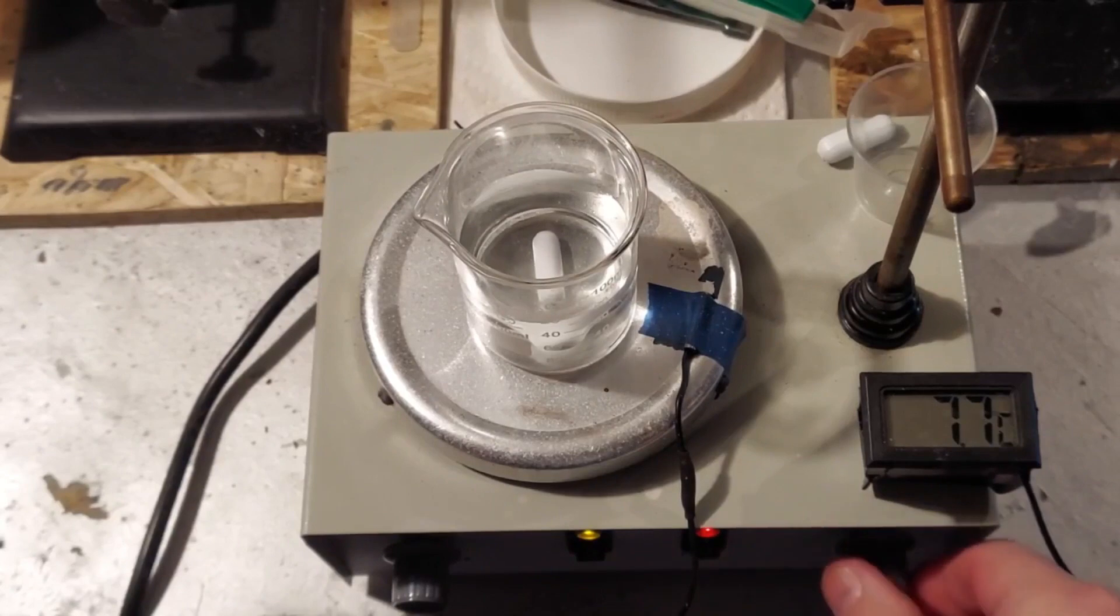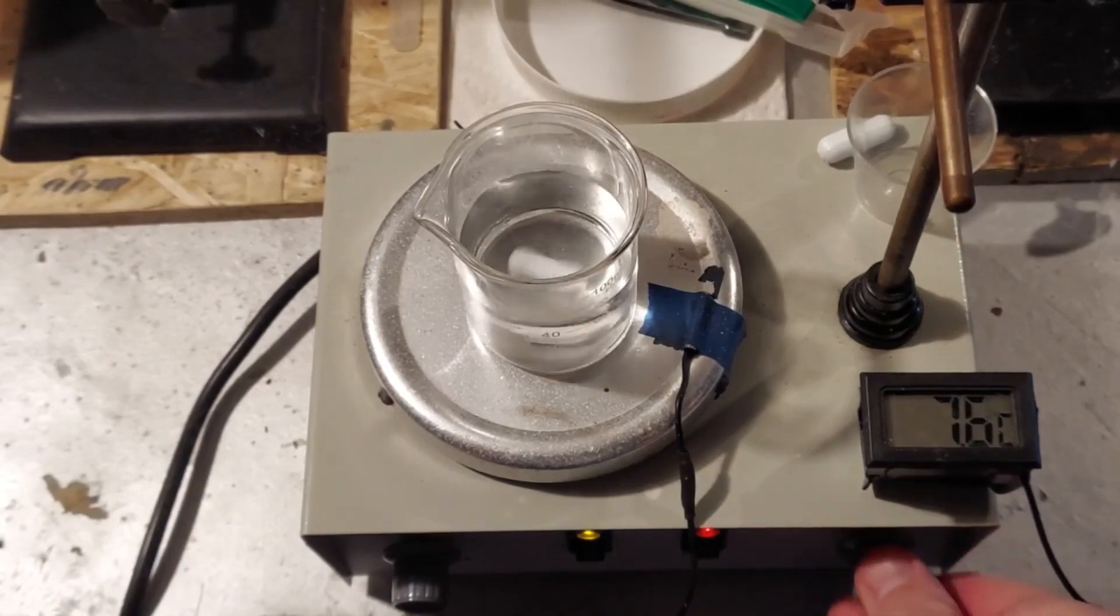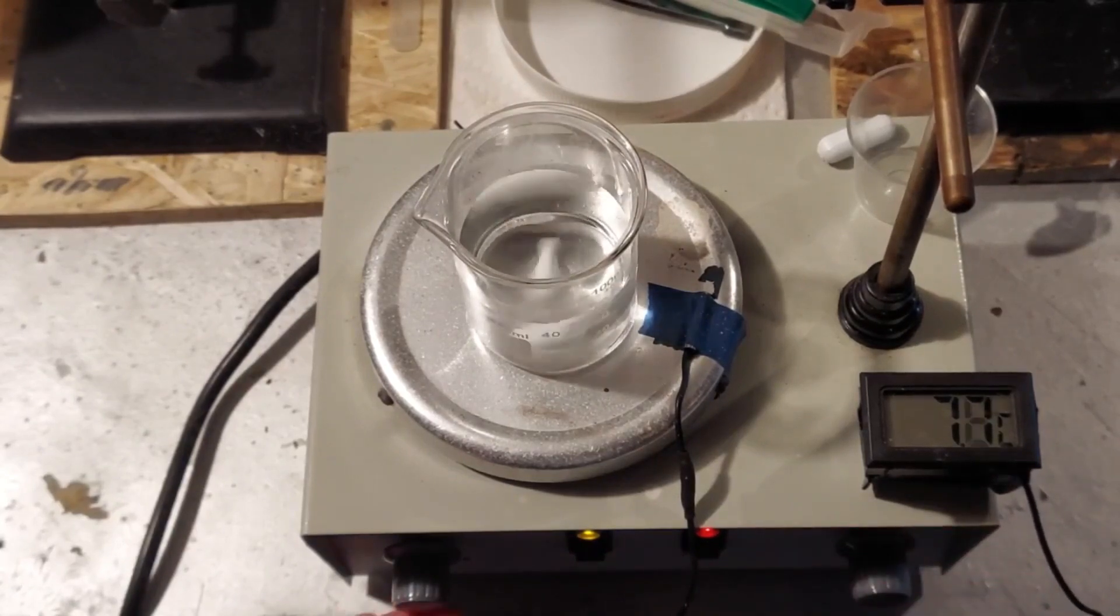Next, we're going to start heating the distilled water up. So I turn my stir on just to make sure the water is mixed well as it heats.